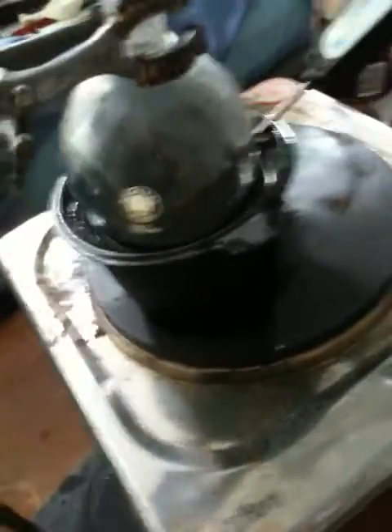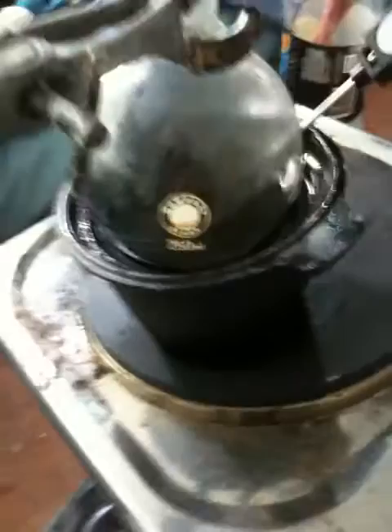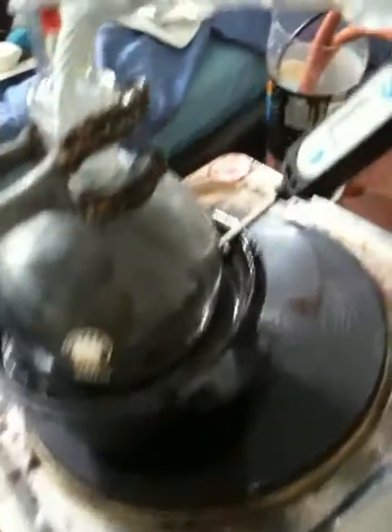As you can see, I have to mop up. So I set everything up back up again. Unfortunately I don't have a lab jack, so I'm just using some crappy old books. And then I've got my hot plate on top of that, and it's already fallen once and sort of tilted to one side, which sort of made me crap myself for a sec, but it's alright now — it's solid.